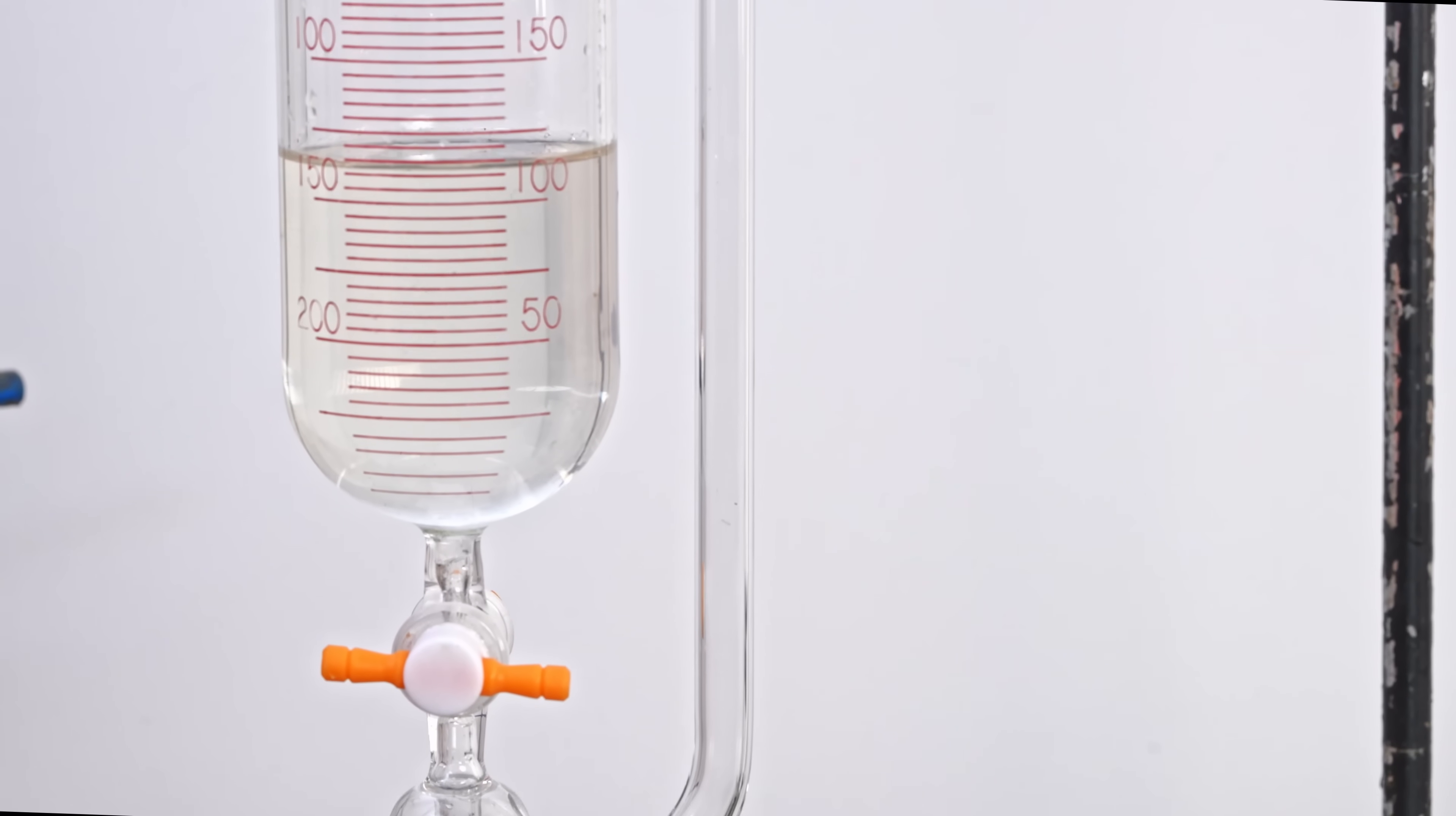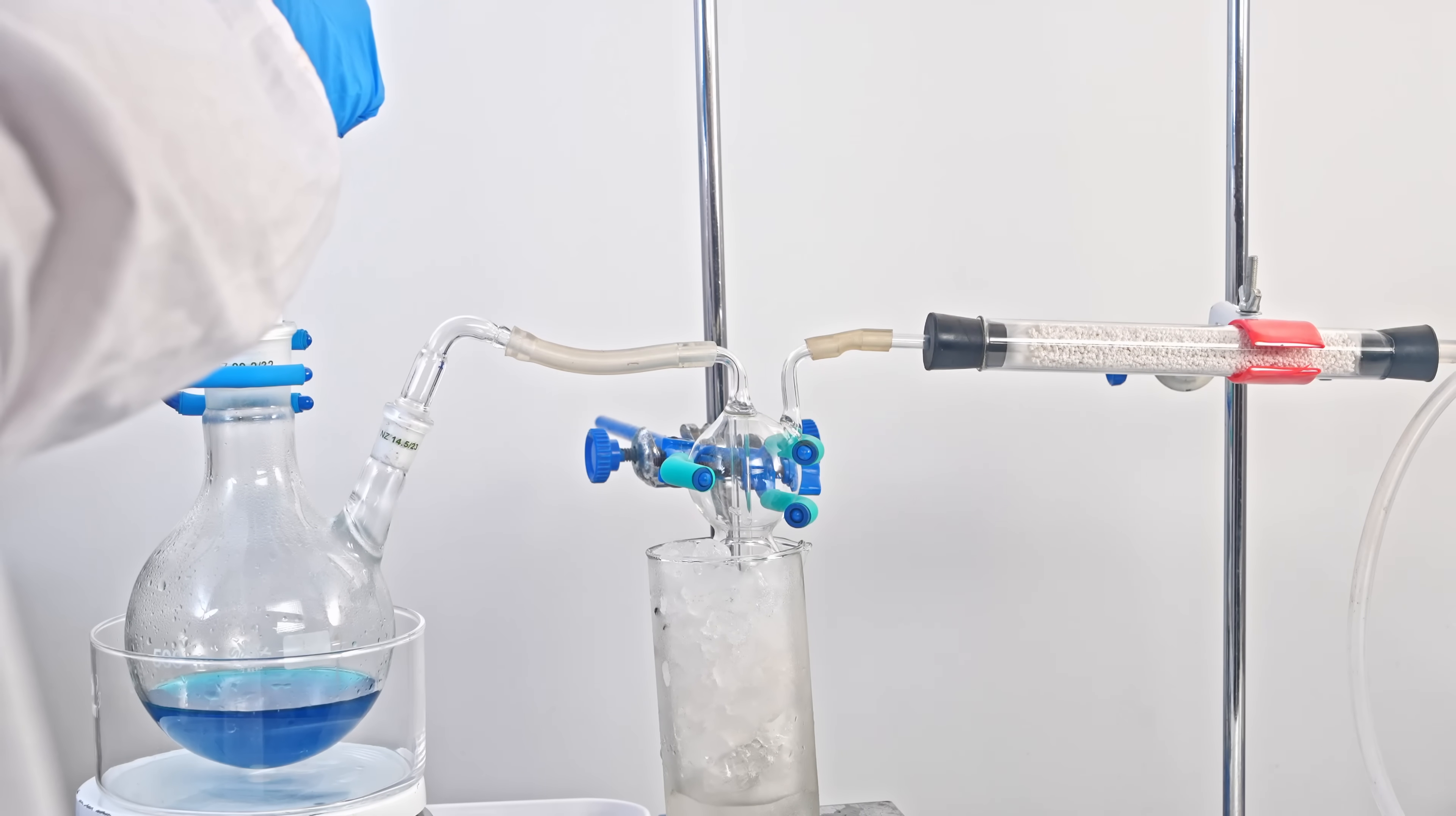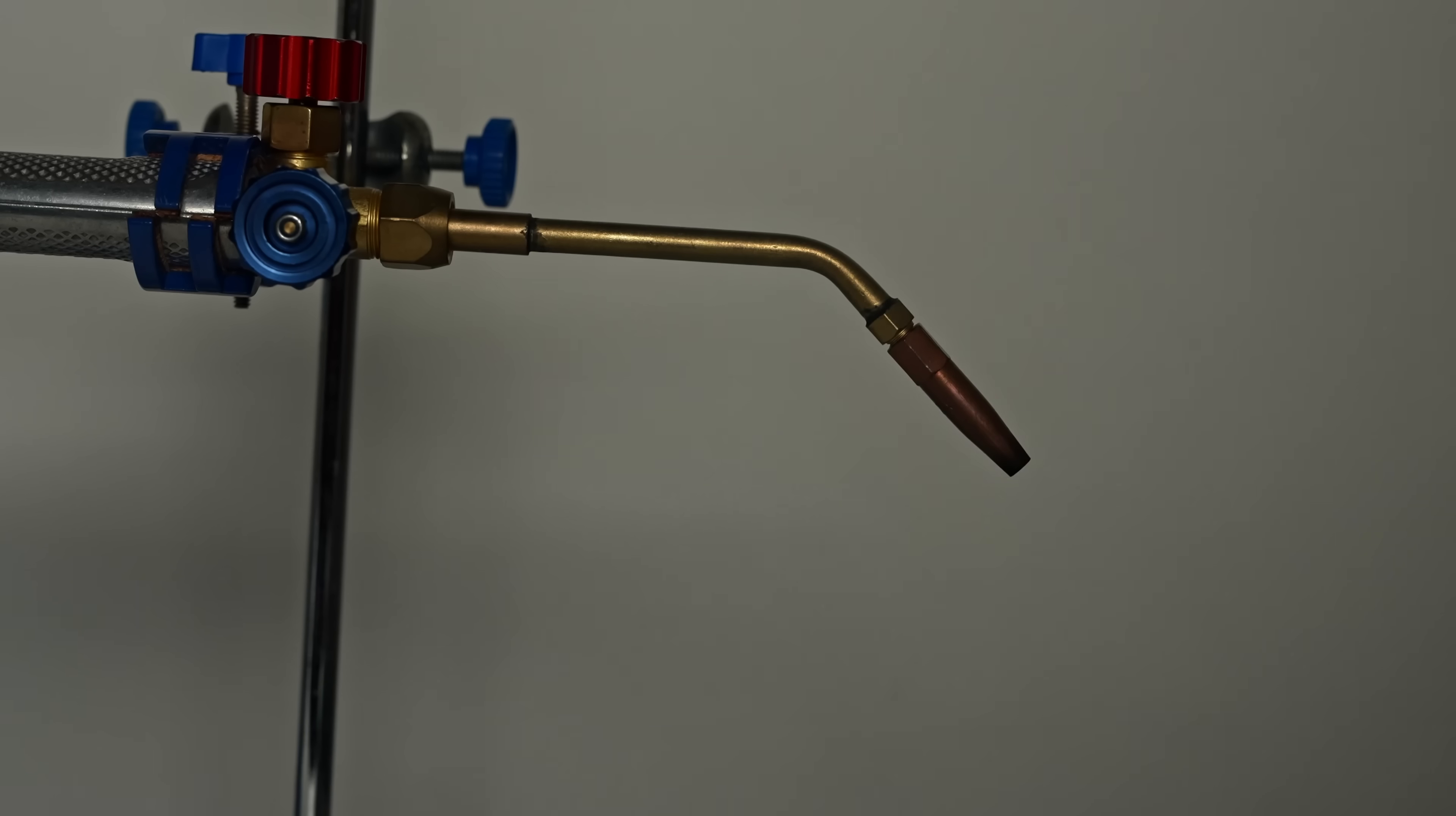Hey guys! In this video I'll show you the synthesis and combustion of cyanogen in ozonated oxygen. The combustion of such a mixture exceeds 4000 degrees Celsius and is one of the hottest flames that can be obtained in a chemical reaction.